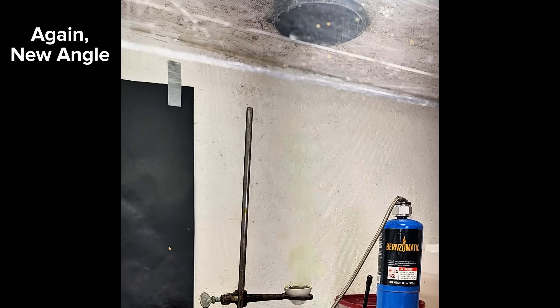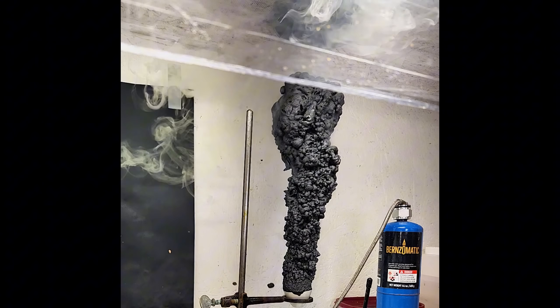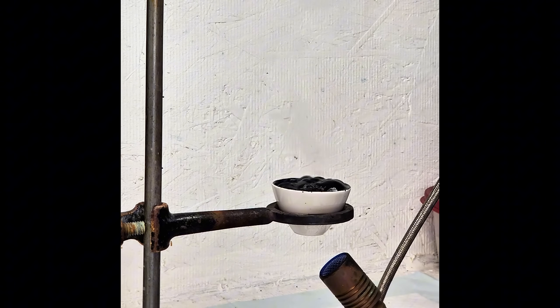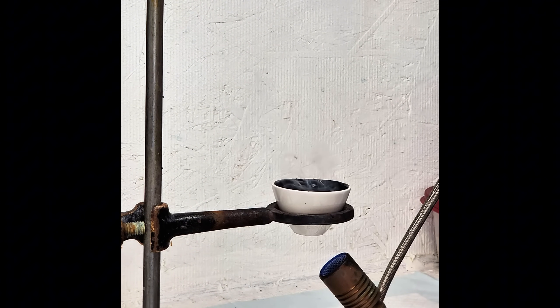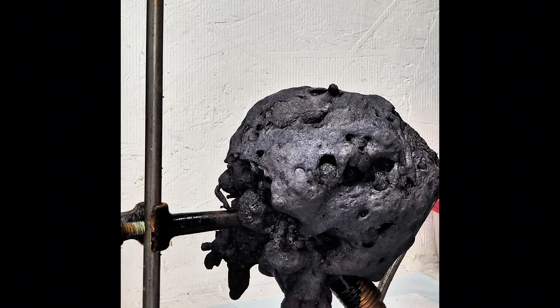What's unique about this reaction isn't the explosion itself, but rather that the plume of material formed holds its shape and structure perfectly. I've heard this reaction called the exploding snake demonstration, and it's one I've wanted to try for quite a long time. I did try this reaction a second time using 5 grams of para-nitroaniline, but this second attempt just kind of fizzled out and exploded all over my Bunsen burner. It seems that you need your reaction vessel to be an appropriate size for the mass of para-nitroaniline — if the reaction begins to bubble over the sides before the moment it explodes, you'll just get a weak puffball. I actually need the rest of my para-nitroaniline for upcoming projects, so I decided not to try a third time, but I certainly intend to make more since it really wasn't as difficult as I imagined.